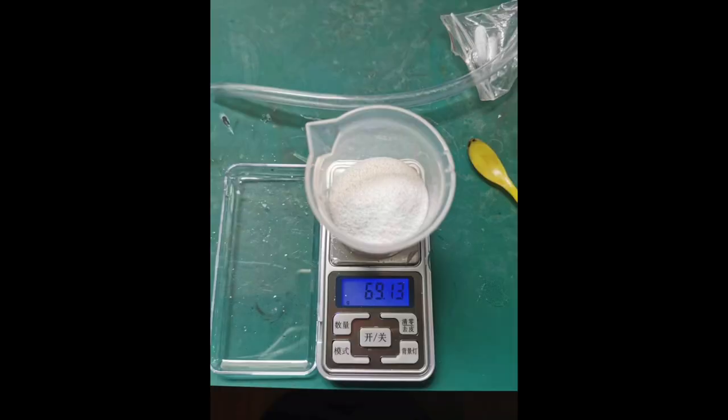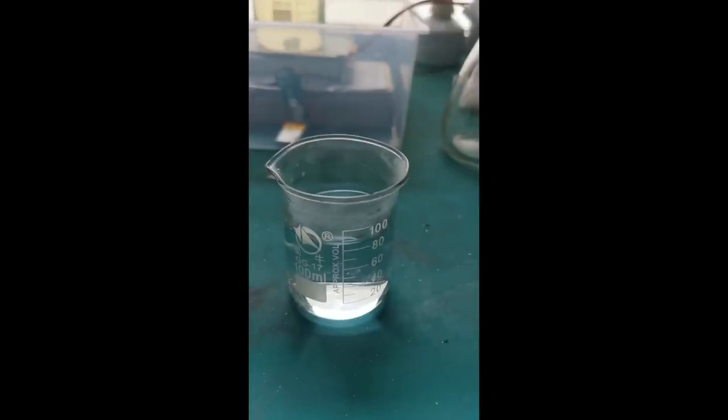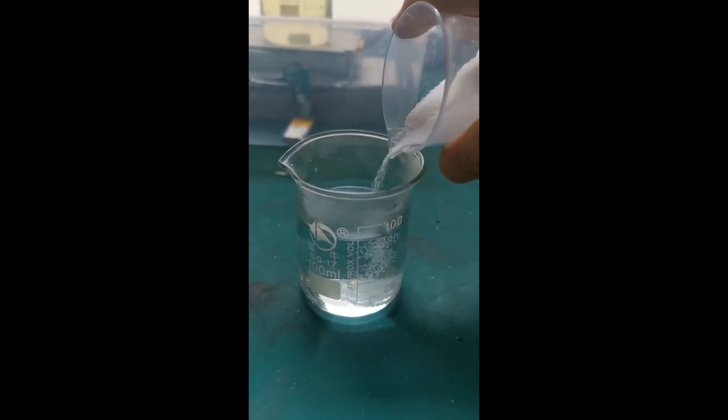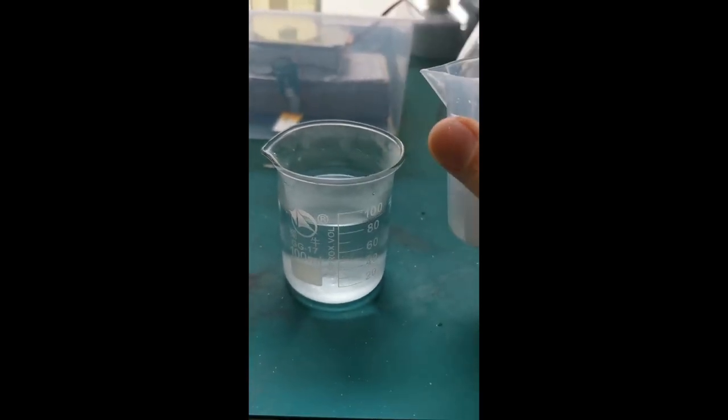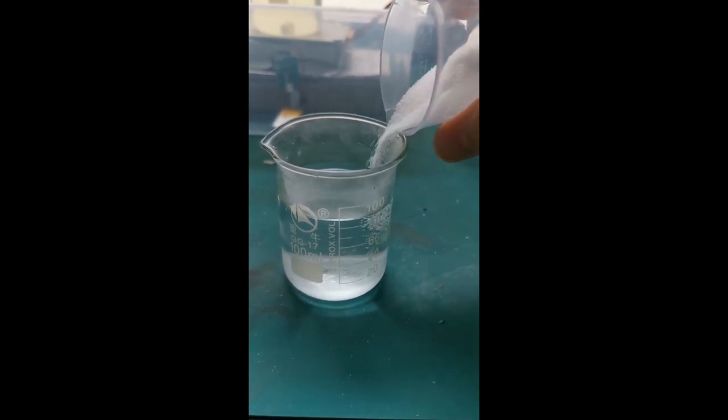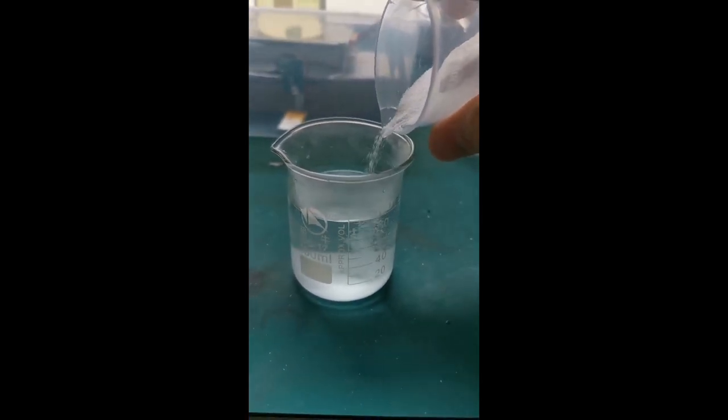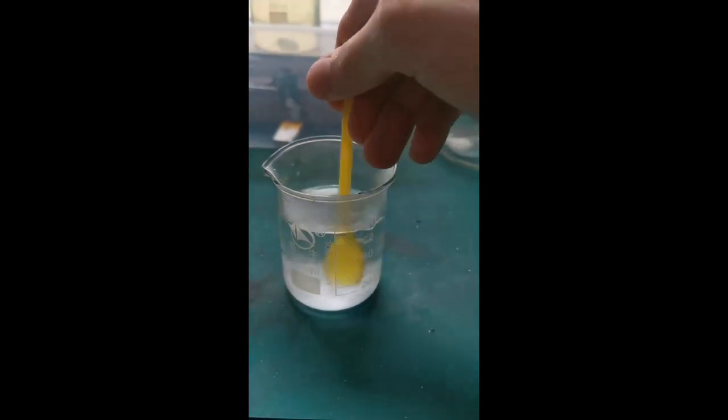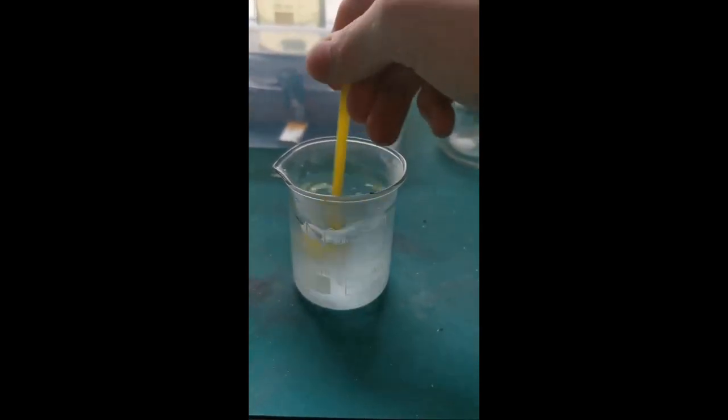Next, I measured out 69.13 grams, or half a mole, of anhydrous potassium carbonate, and dissolved it in 80 milliliters of boiling water as well. The dissolution of the salt was quite similar to calcium chloride, but not as vigorous. I still stirred the solution a little to dissolve the salt. The solution produced was crystal clear.